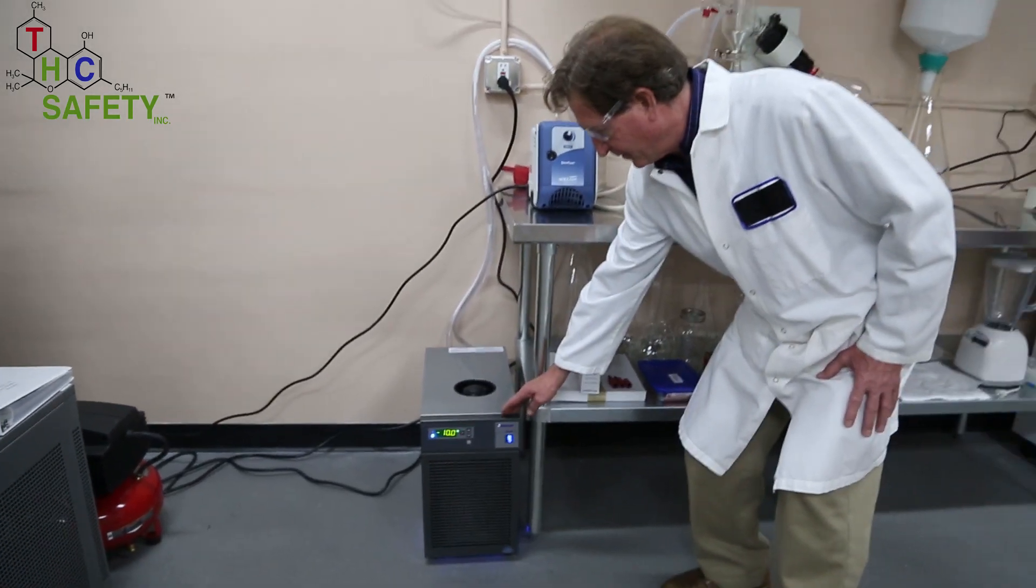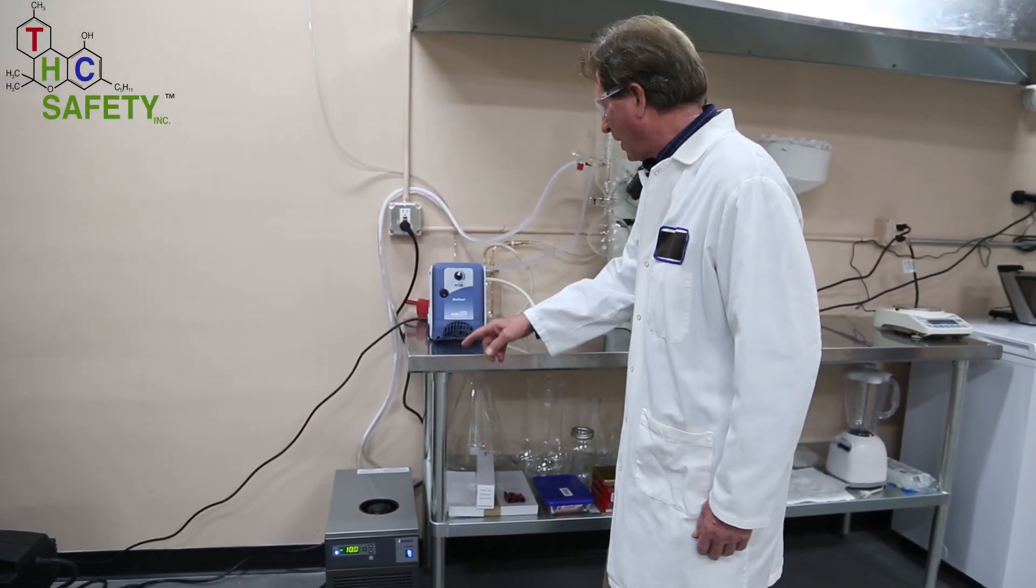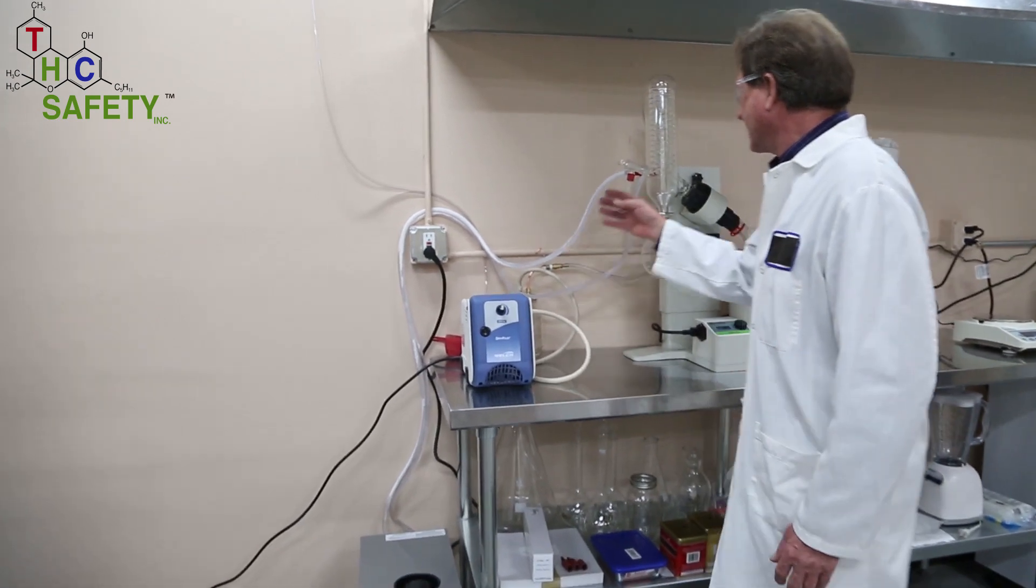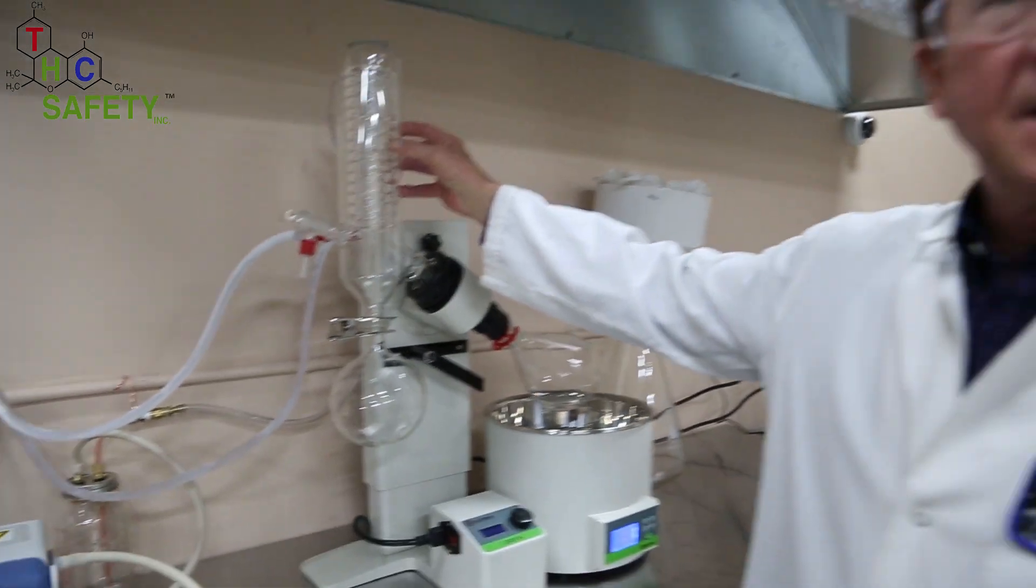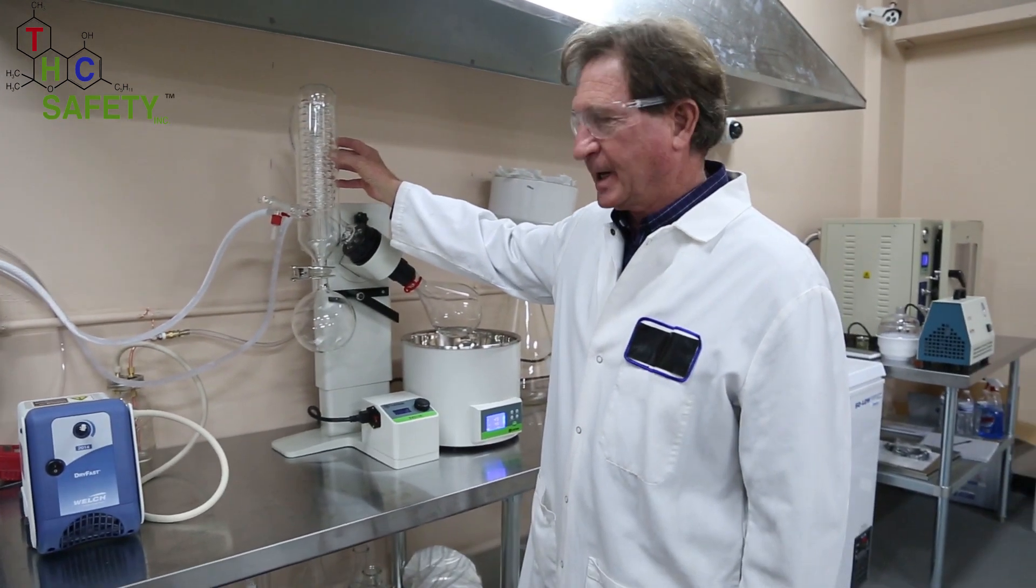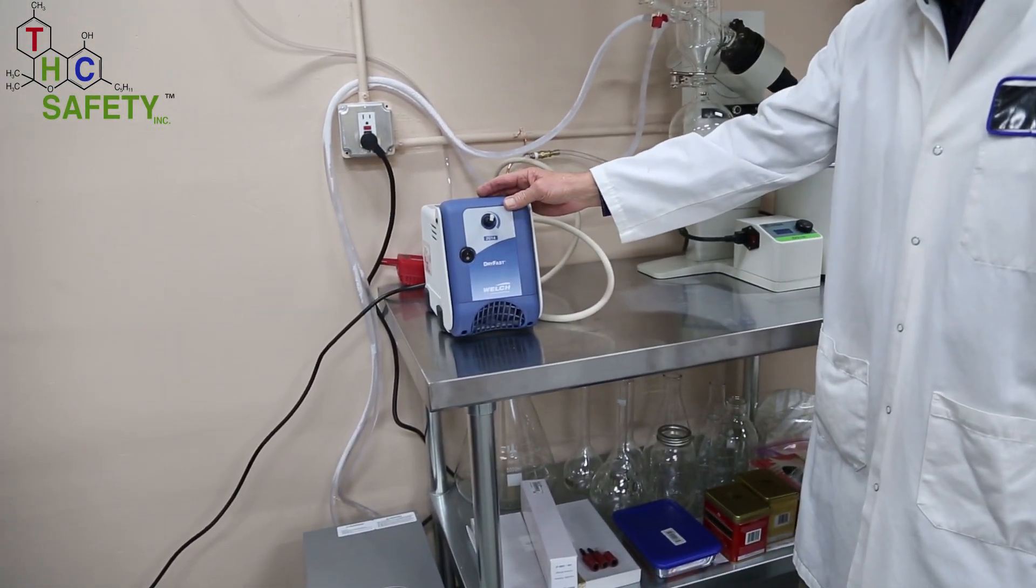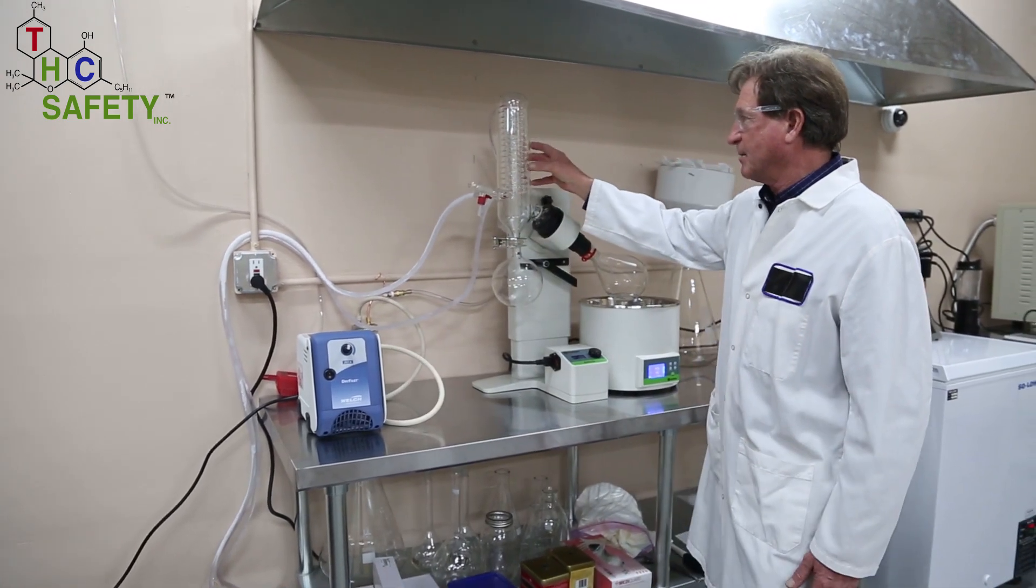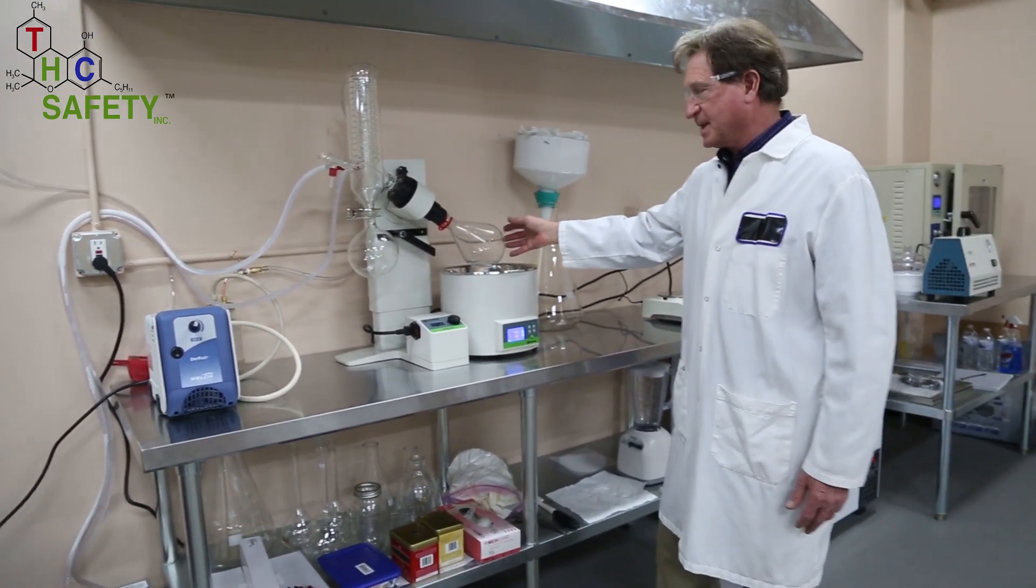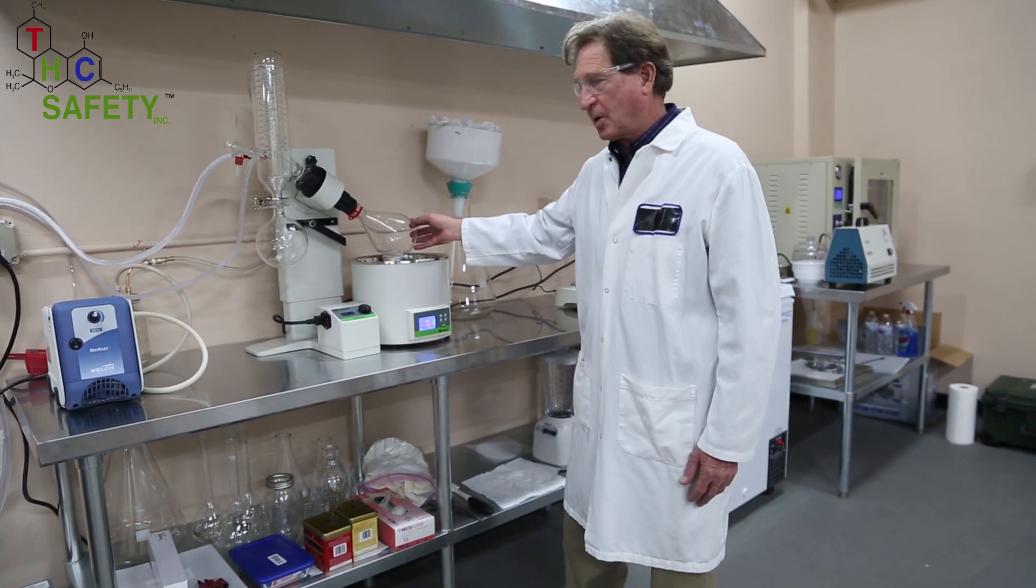This chiller is providing chilled water through these hoses to this coiled condenser to change the vapor into a liquid. We're using this vacuum pump to reduce the pressure in this system so that the ethanol boils at a lower temperature.